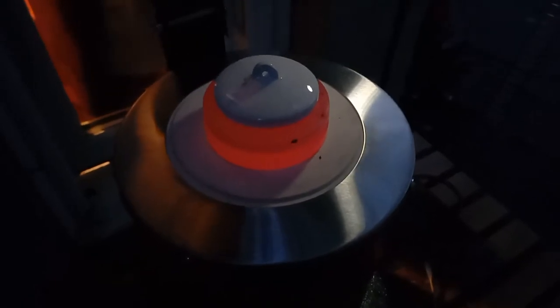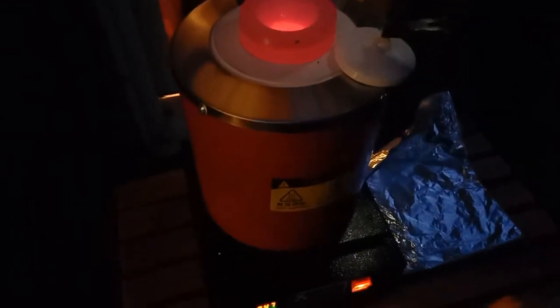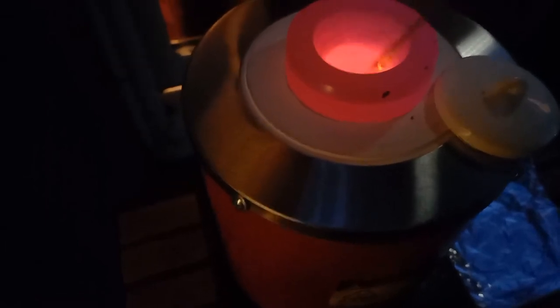I think I messed this up. I'll stir it and see. Here's another quick stir. What is that? Feels like there's a load of sodium still and it's not melted. Why is that?